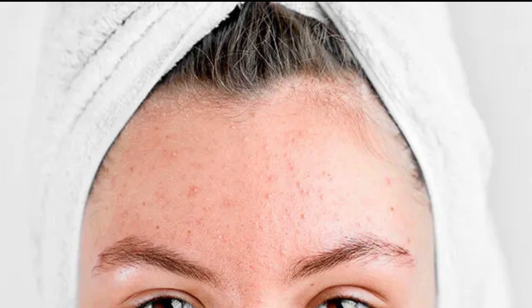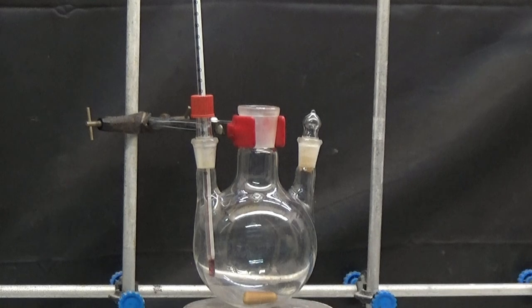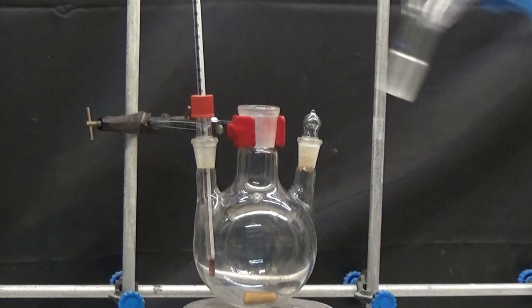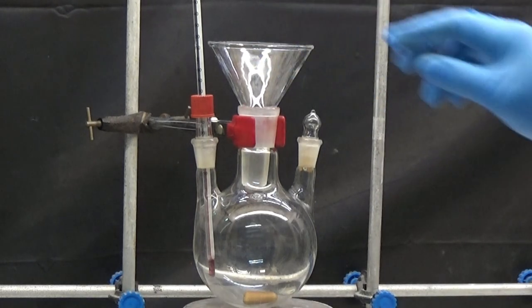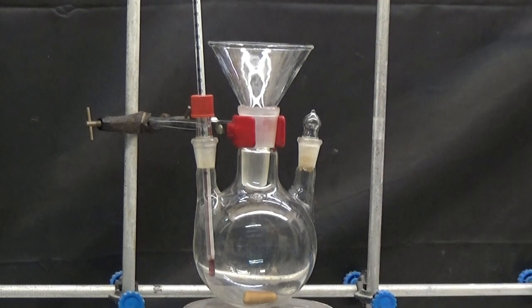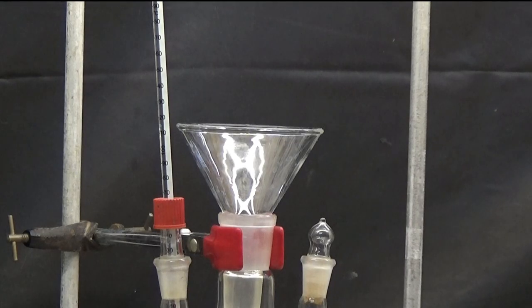It is used in cosmetics to exfoliate and remove skin imperfections. For this synthesis, we will use a 500 milliliters flask with three necks. In one neck we will put a thermometer and another we will cover it with a glass plug. Add reagents in the sequence below.